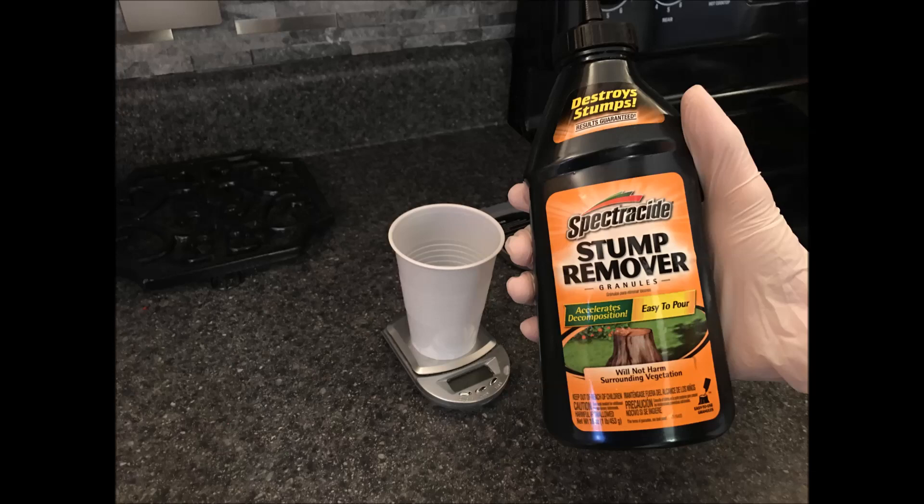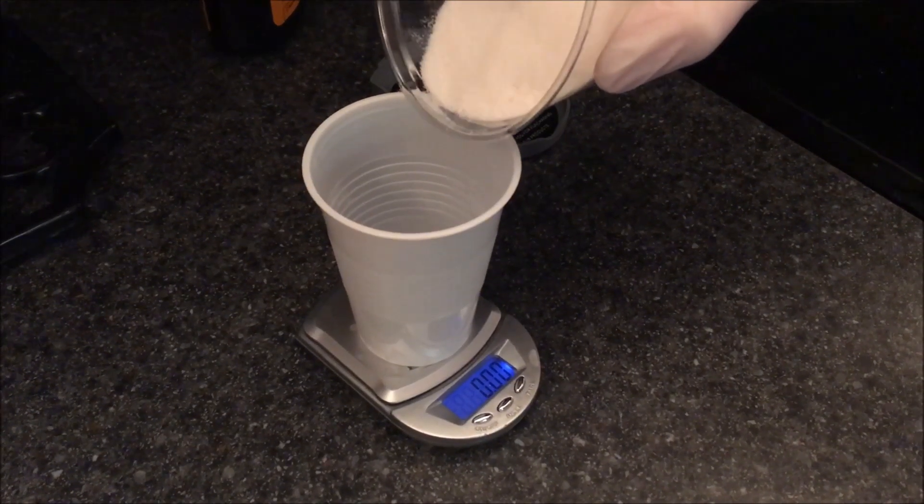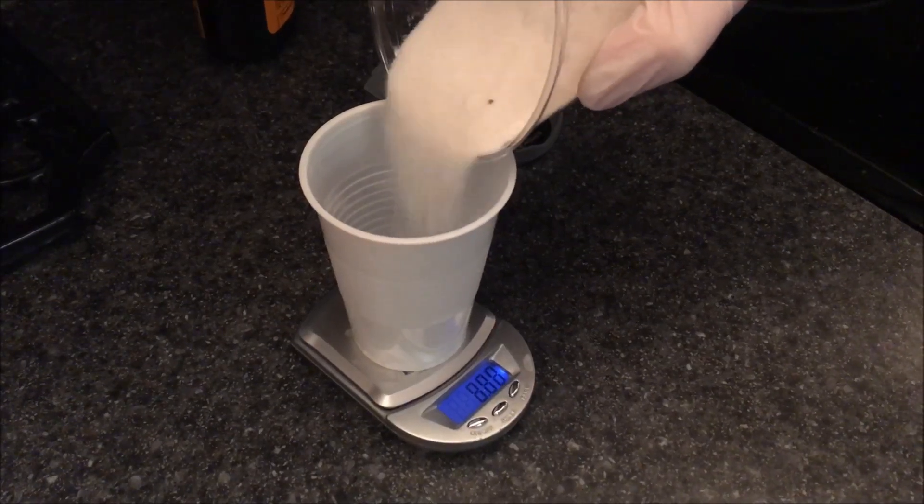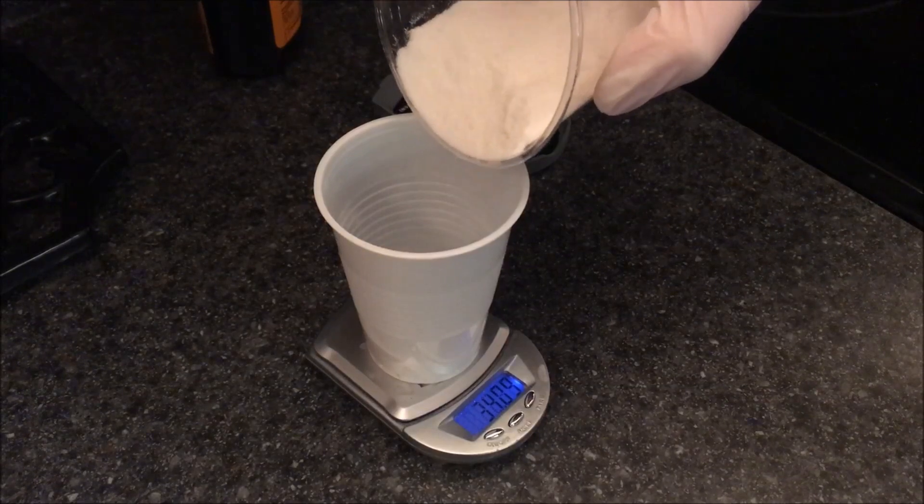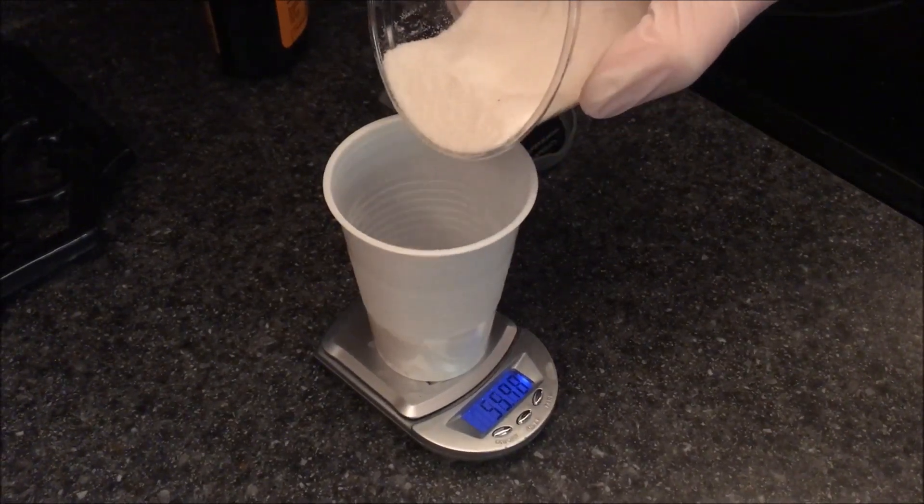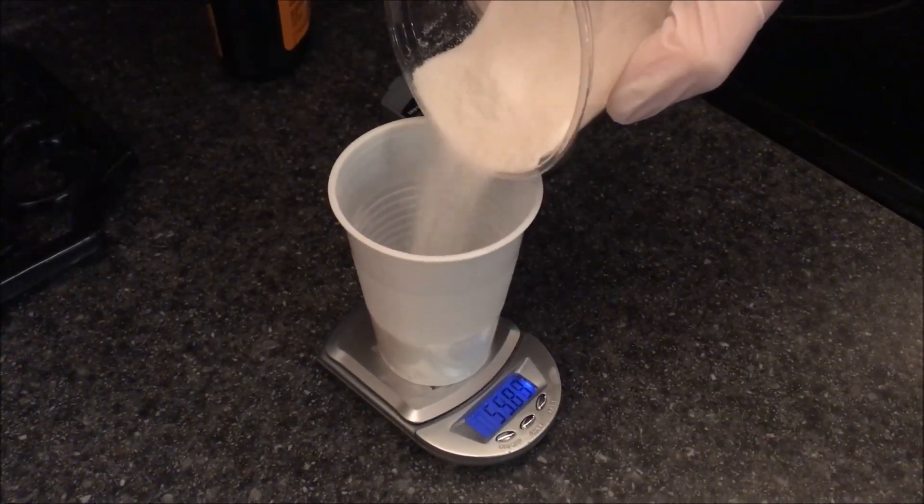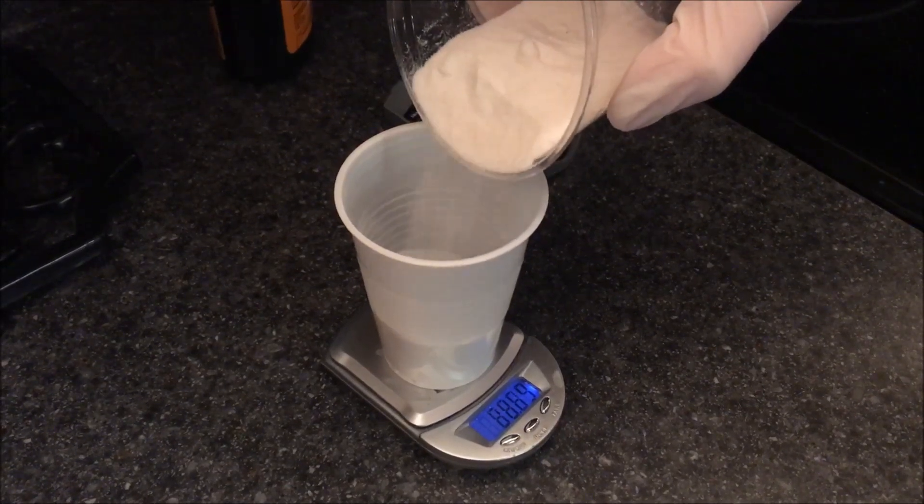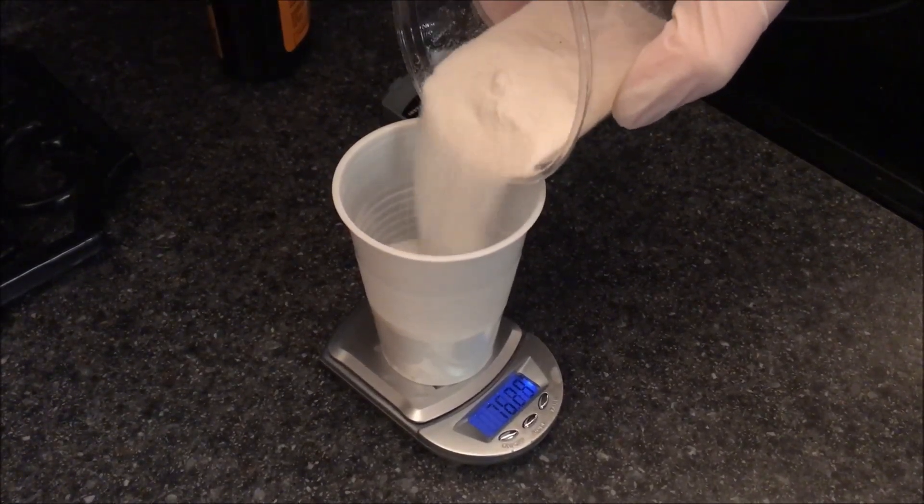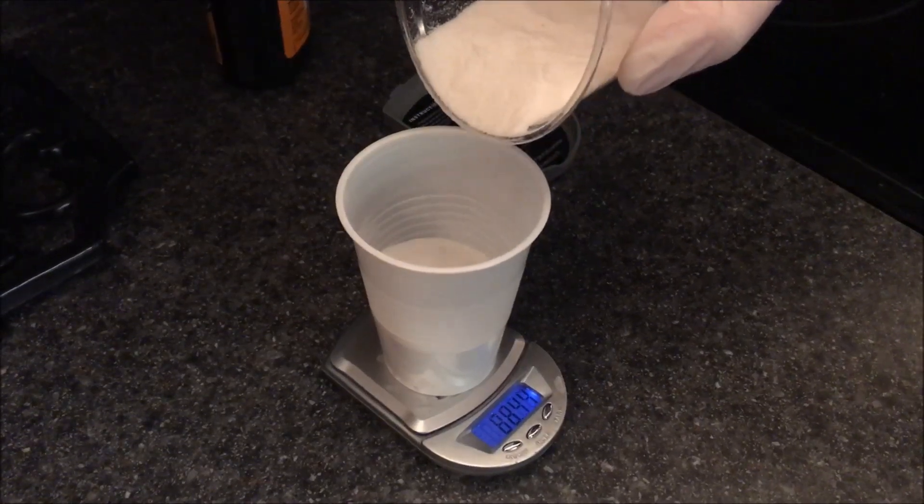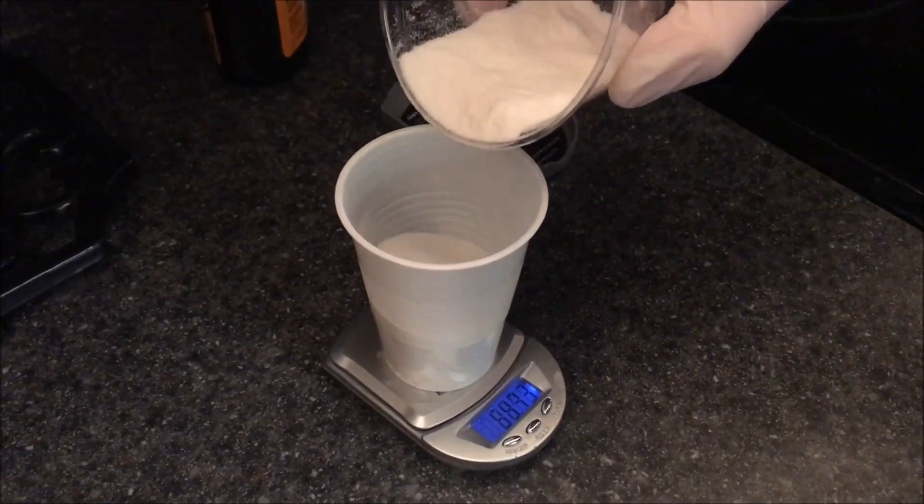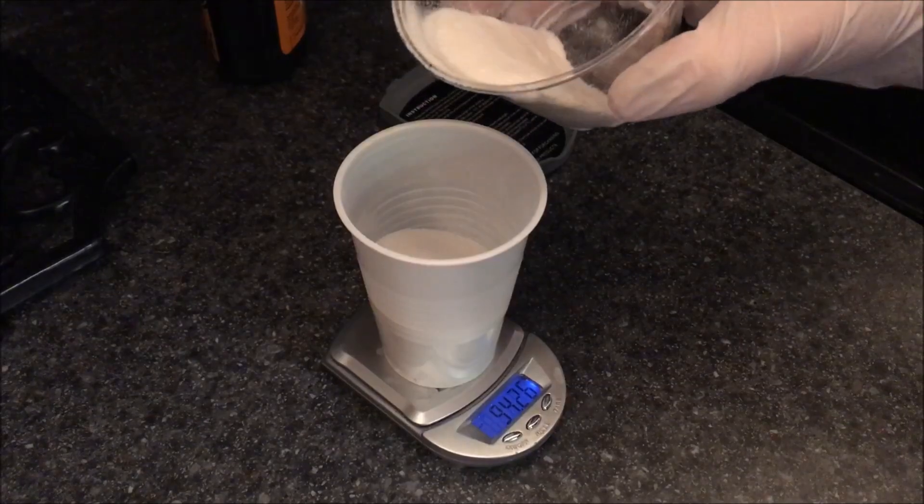First, we will need potassium nitrate. The potassium nitrate I used was from stump remover, so it probably has a few other impurities. I measured out 343 grams of potassium nitrate. I had to do it in small portions because my scale didn't go up to 343 grams.